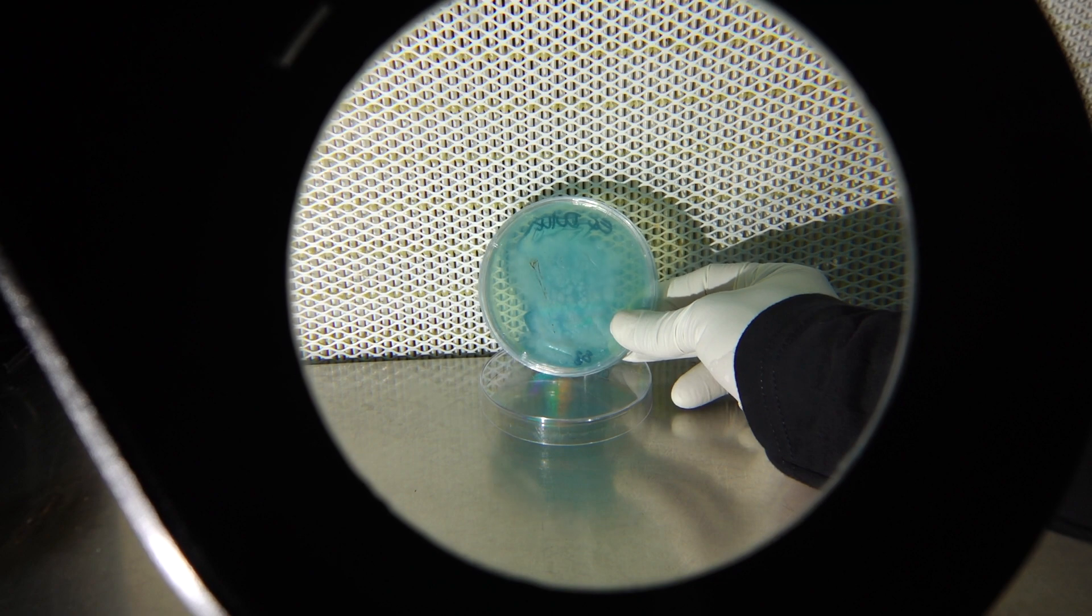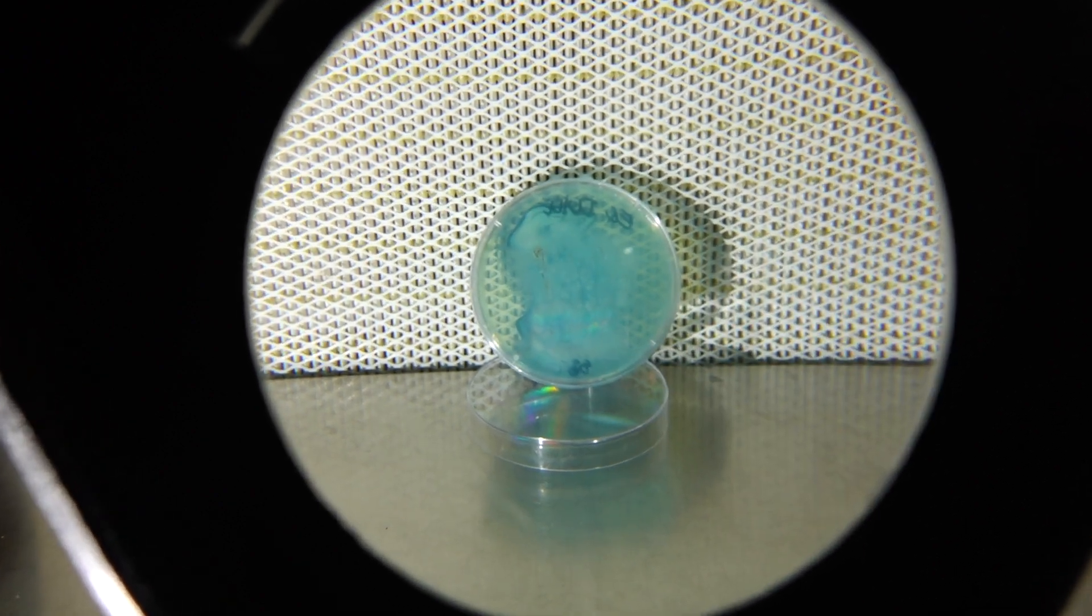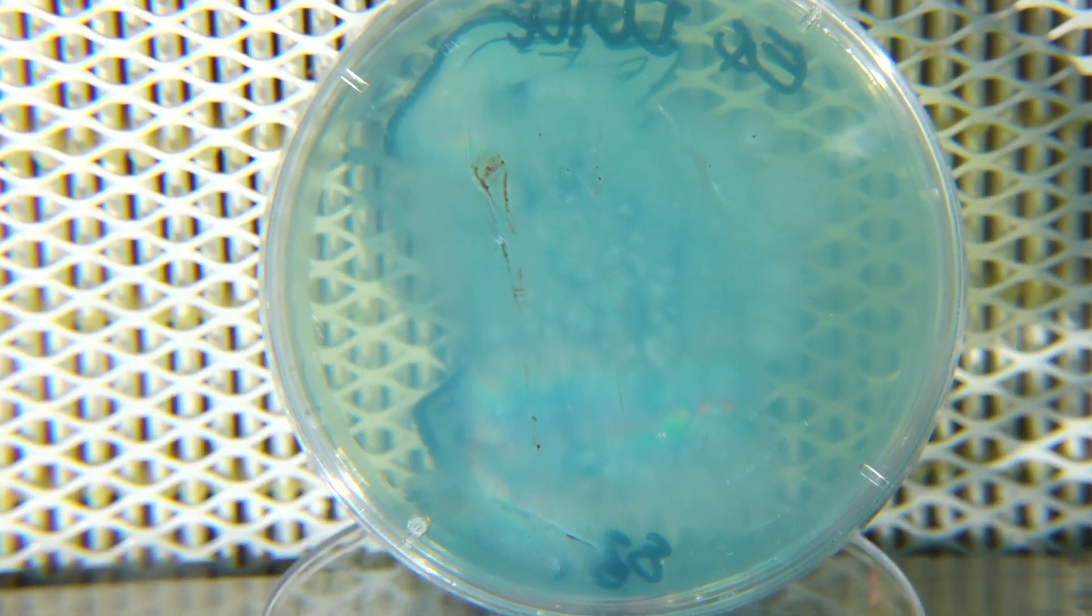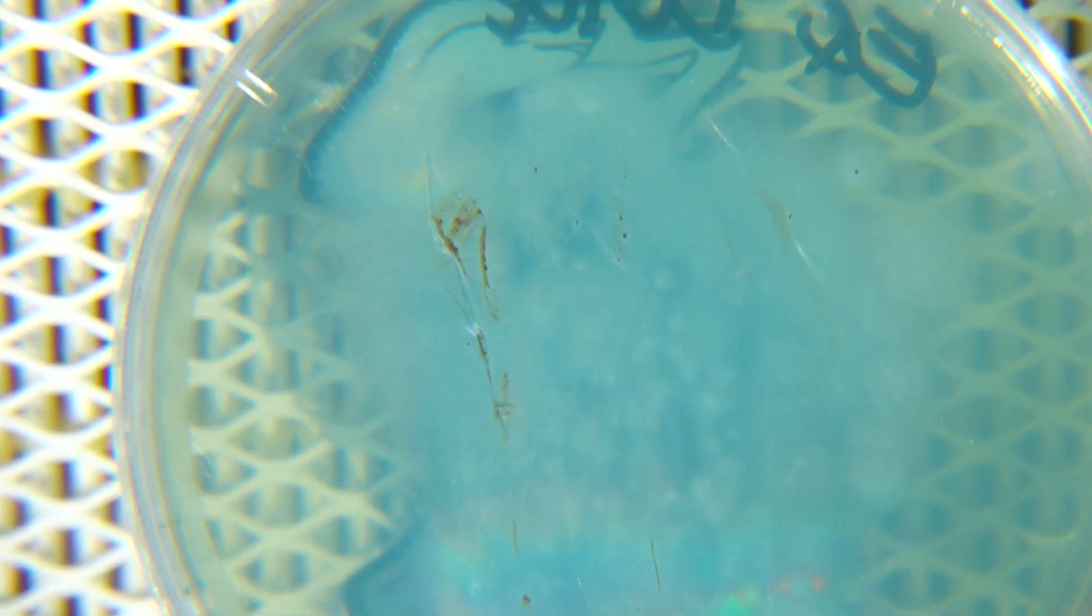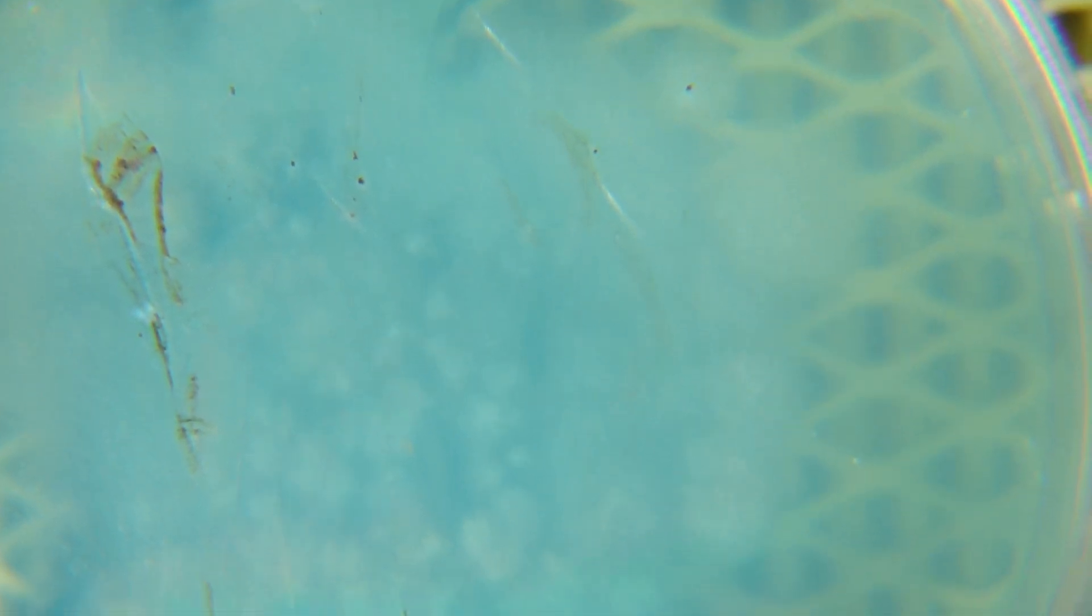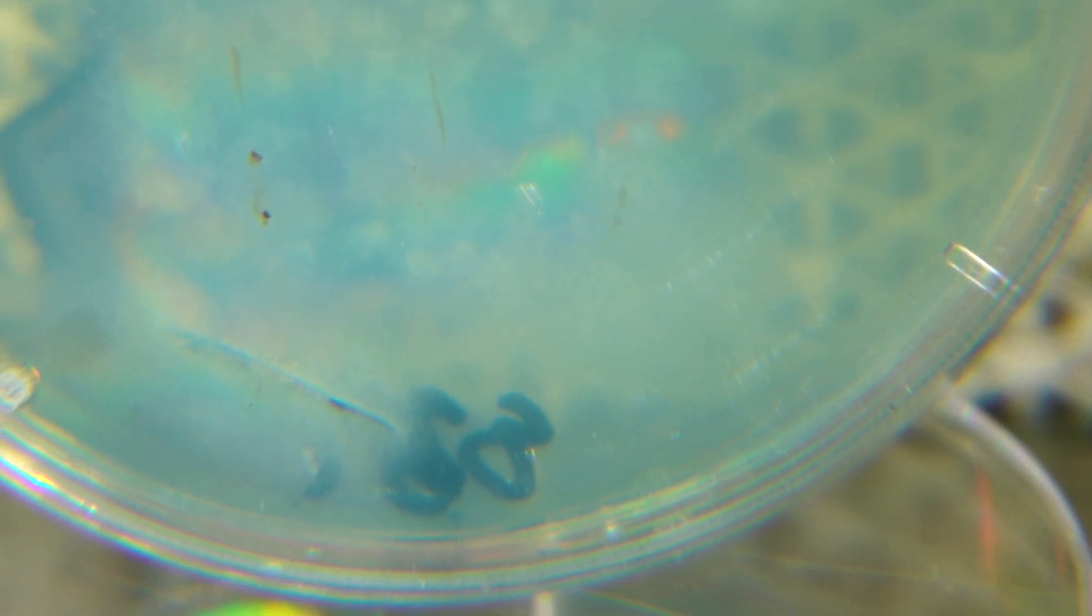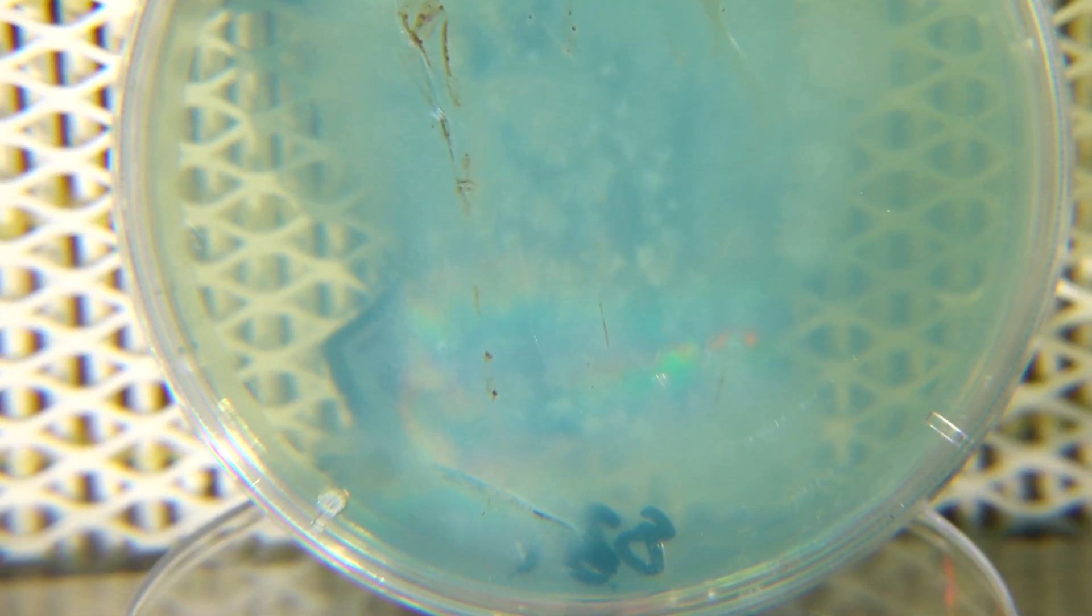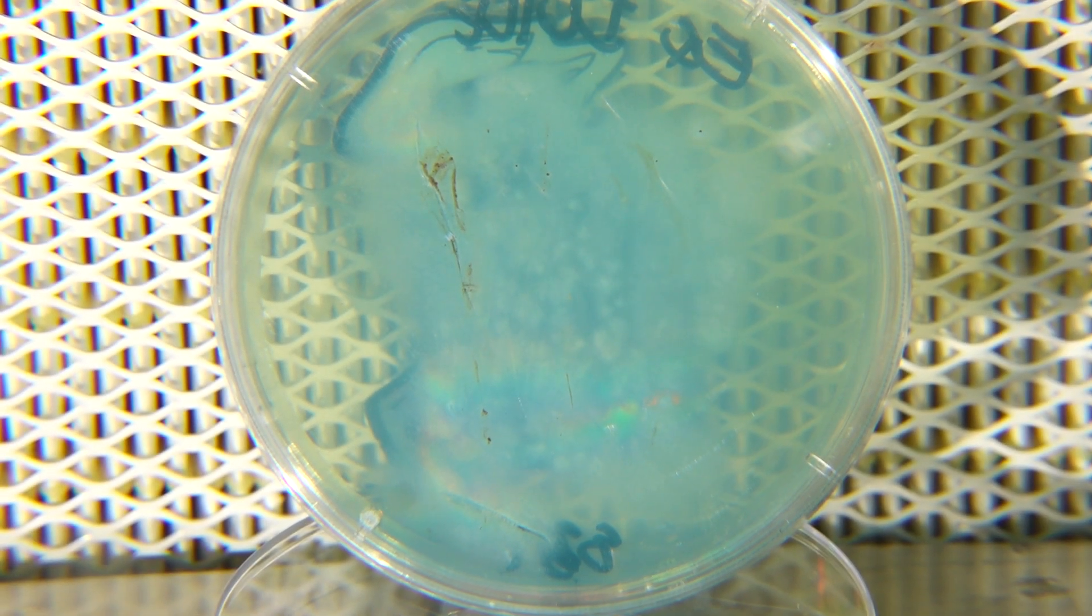This next plate is the Ecuador also showing very promising growth. You can still see some of the very dark spores that I placed on there originally and the streaking method actually worked really well. You can see that most of the plate is covered. I would say about 70% of the plate is covered. We'll give this a couple more days before we start making transfers for the next part of our series.